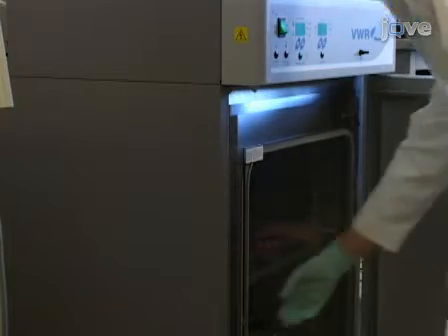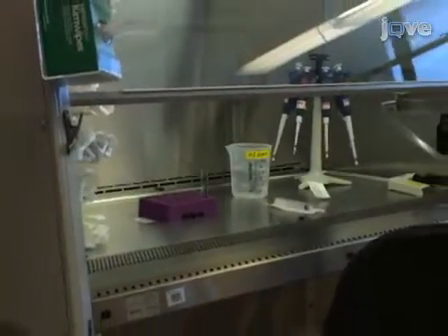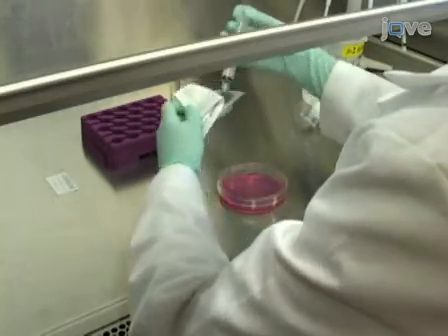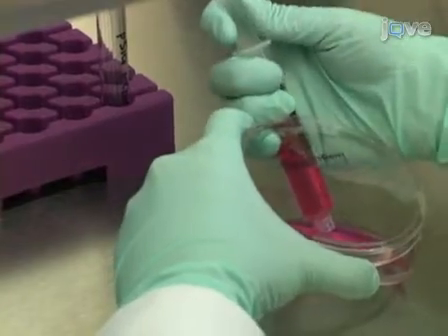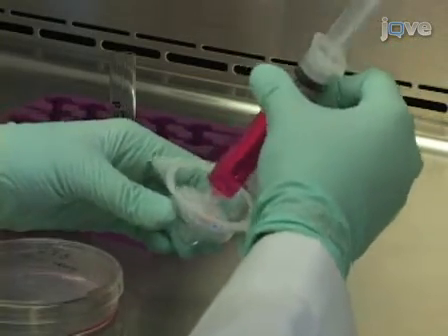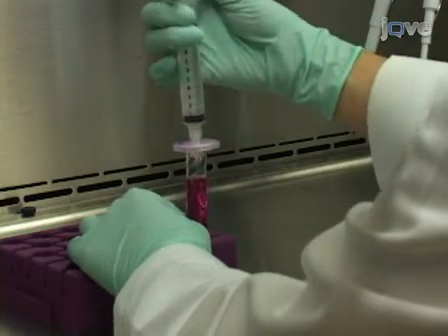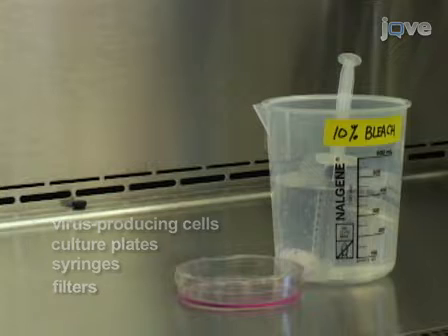During incubation, the 293T cells produce lentiviruses whose genomes contain an RNA copy of your DNA of interest. Now it is time to collect the virus. Have ready in the tissue culture hood a 0.45 micron syringe filter, a disposable 10 milliliter syringe, and an ultra-clear Beckman centrifuge tube. Use the disposable syringe to remove the supernatant which now contains the virus. Attach a 0.45 micron syringe filter to the tip and filter the virus into the centrifuge tube. The filter allows only viruses and not cells to pass through. Before discarding, incubate all virus-producing cells, culture plates, syringes, and filters in 10% bleach for 45 minutes.